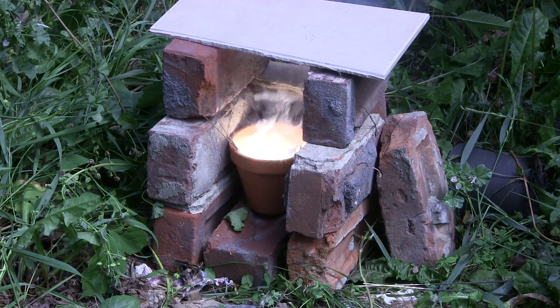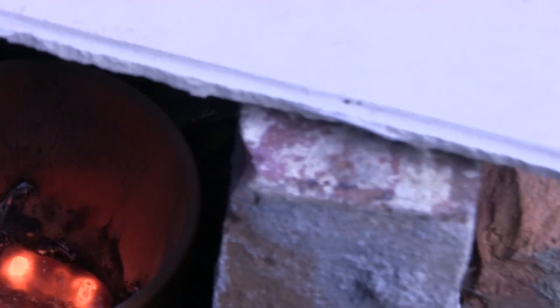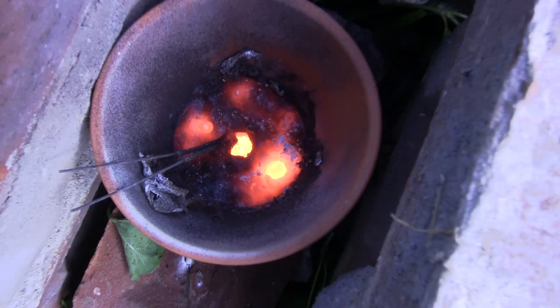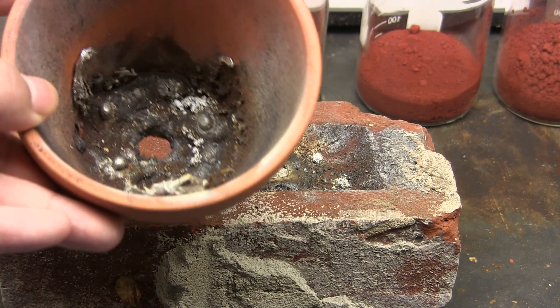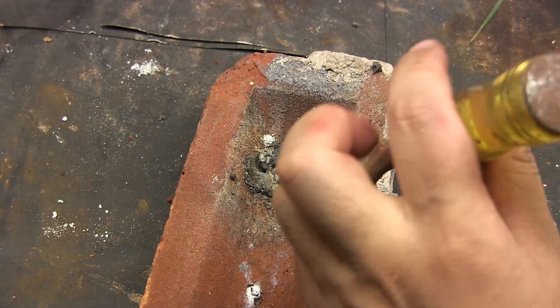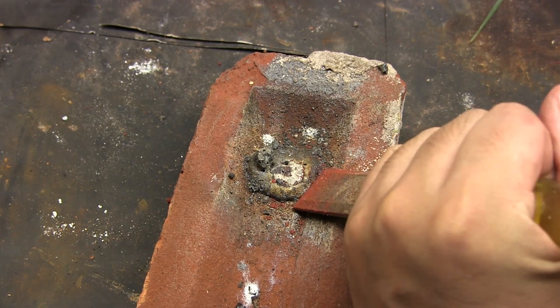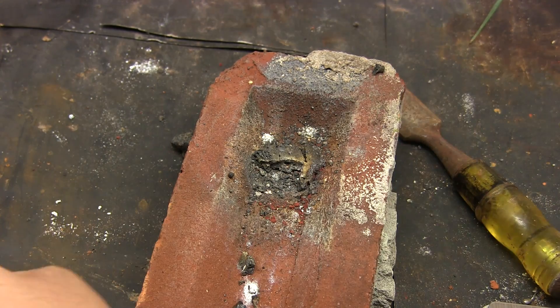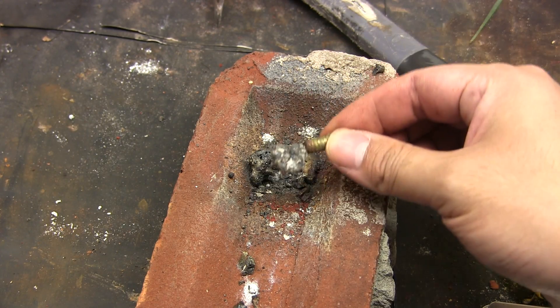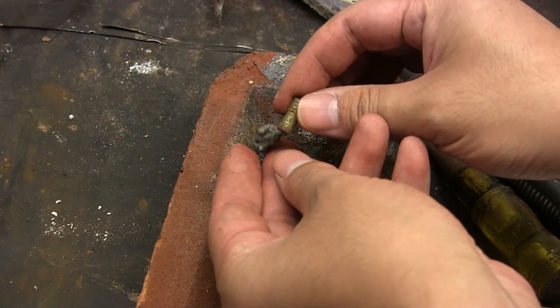And there it goes. Only 40g total of thermite and it was hot enough to crack the flower pot. You can see some of the red hot globules of molten iron. The rest of the iron has drained through the hole. A couple of hours later, you can see three shiny globules of solidified iron metal, and on the brick we have the rest. Most of this is actually a slag of aluminum oxide so we'll have to smash out the iron with a hammer and chisel. A lot of people mistake the red hot molten liquid as pure iron when they're actually looking at the slag. There is our nugget of iron. We can test it by holding a magnet near it — iron has a very strong attraction to a magnet. The aluminum oxide slag might have a small attraction from tiny amounts of residual iron but this is very weak.